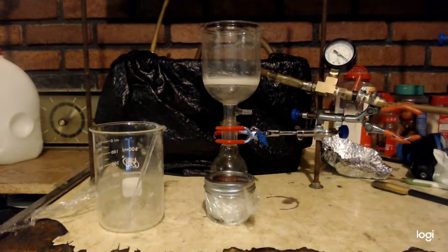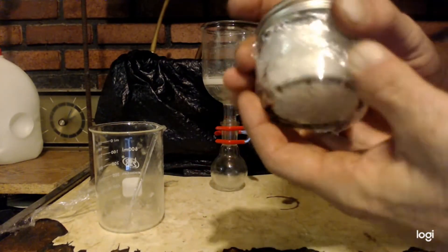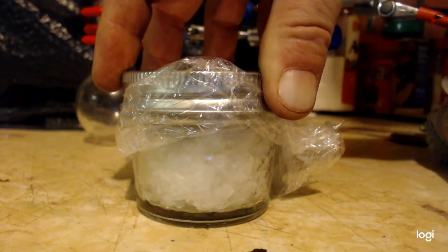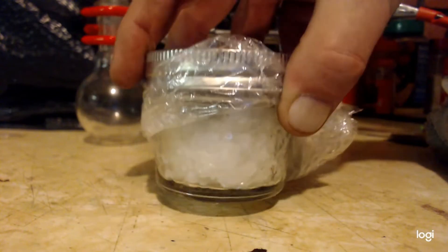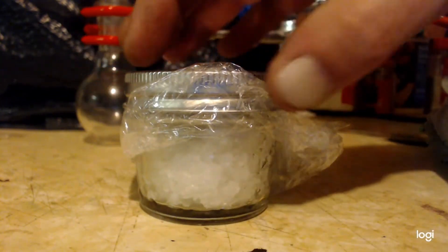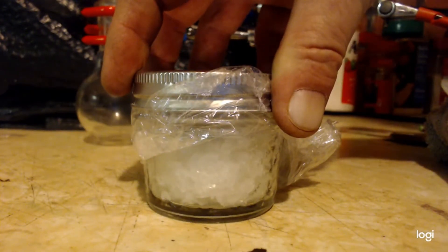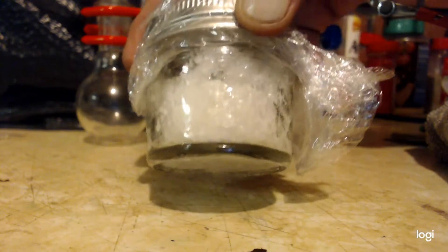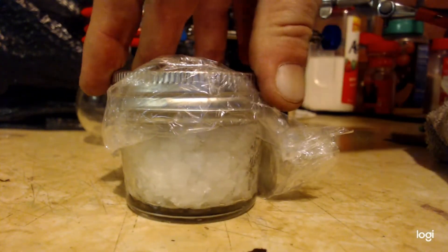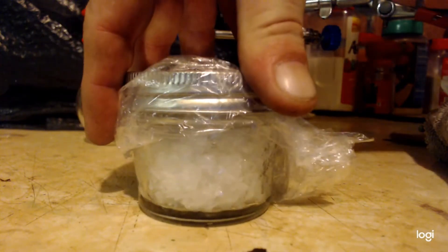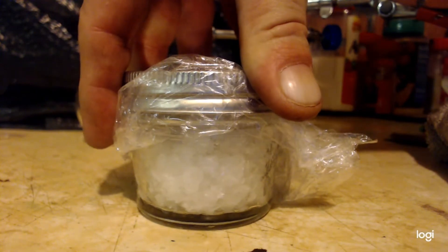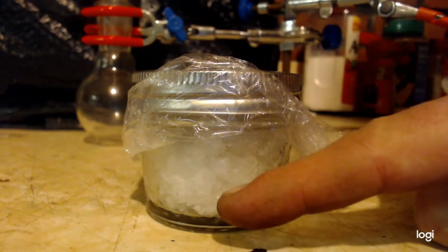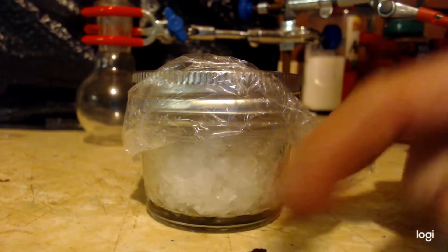I'm putting this back in the freezer. This is some of my product - the first batch weighs 40 grams just the methylamine, and I was shooting for 34 grams total. Keep in mind this is very wet. I put it on the frit funnel with vacuum and got it somewhat dry, but if I left it to dry completely, air would get sucked through the frit funnel across these crystals and absorb all the water. So I'd just be exchanging ethanol for water.